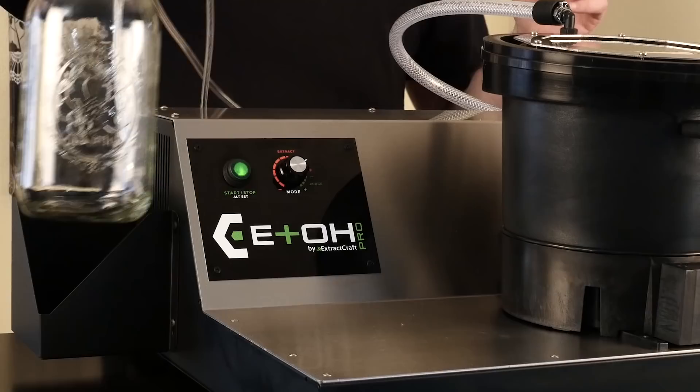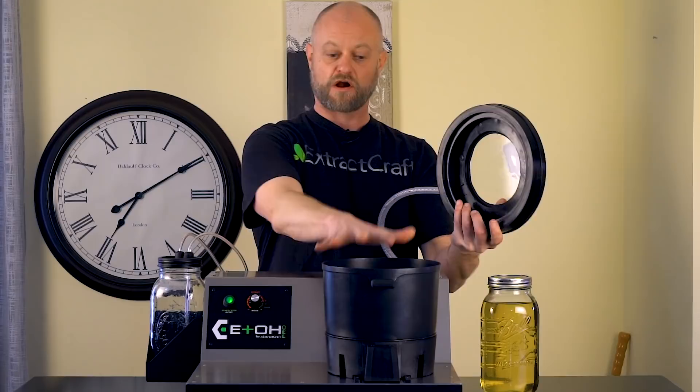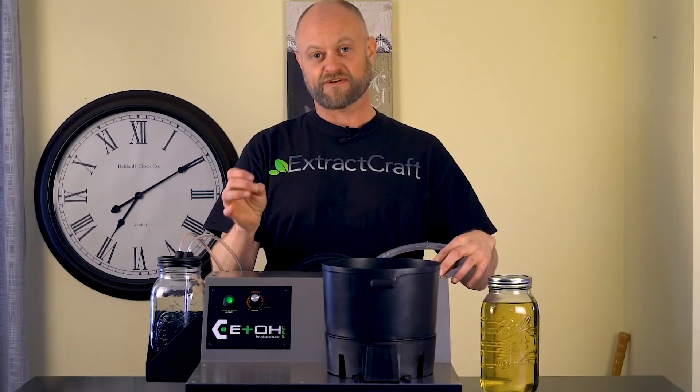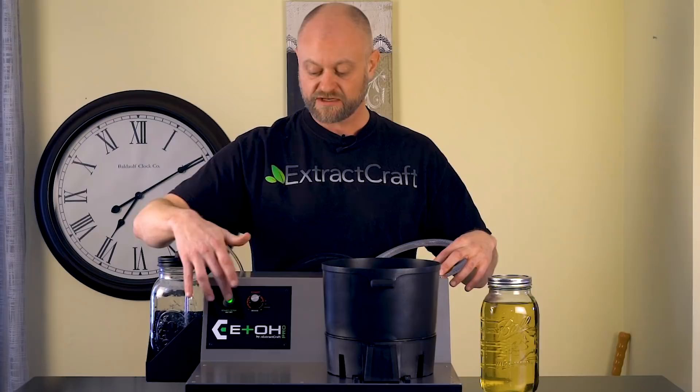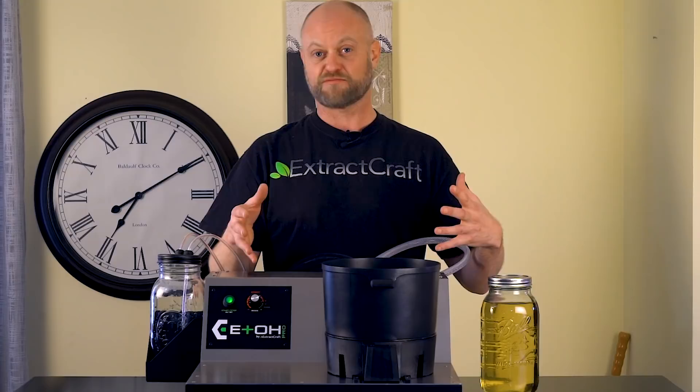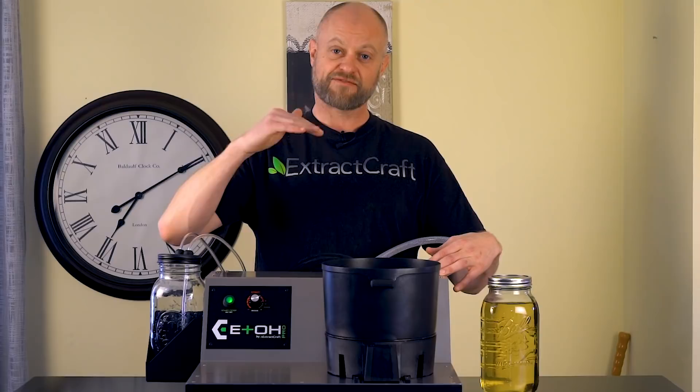We set that and put this into the holster on the side. We have our vacuum lid for our kettle, which is where we put in our extract. For the controls, we have the ability to set the temperature for the EtOH Pro between 96 and 105 degrees Fahrenheit. Everything runs through the button, and you also have the ability to do a purge, but we'll show that in another video. First, we want to show you how to set your altitude, because barometric pressure comes into play when dealing with temperature and vacuum, so we want to set this properly.